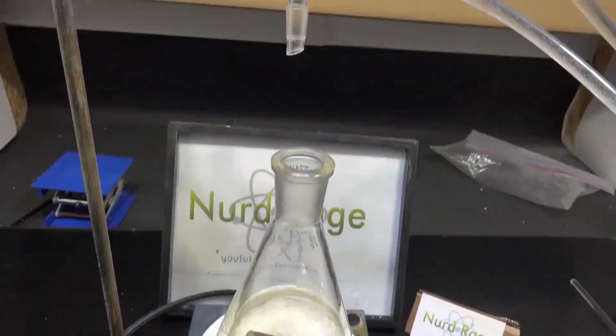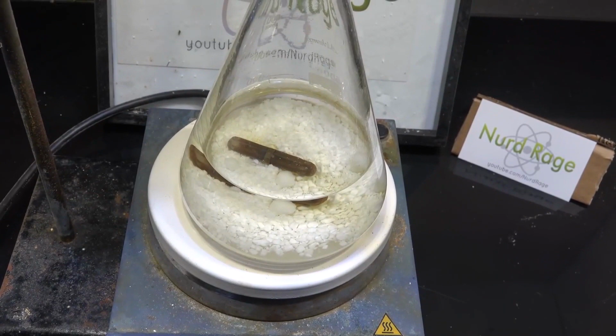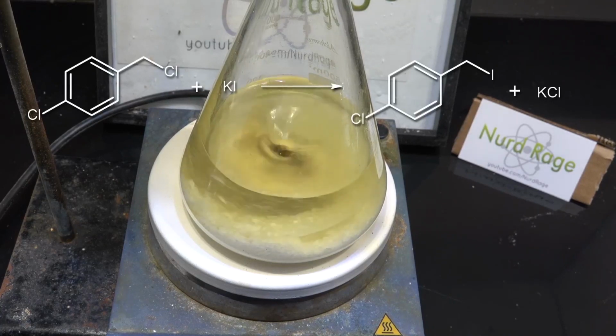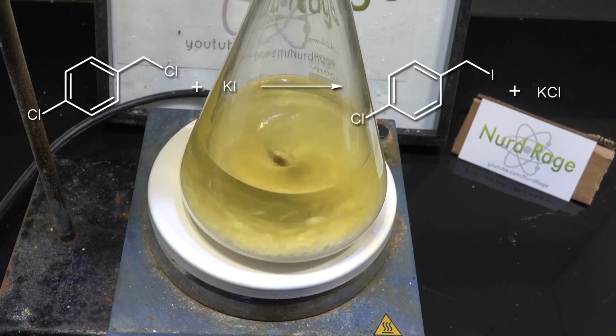Now on top of the flask, set up a reflux condenser column. Vigorously stir the mixture and gently raise the temperature until it just starts to reflux. Two things are happening. First, the potassium iodide is reacting with the p-Chlorobenzyl chloride to form p-Chlorobenzyl iodide and potassium chloride.